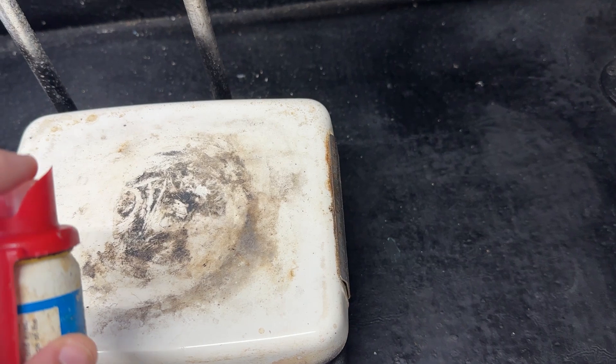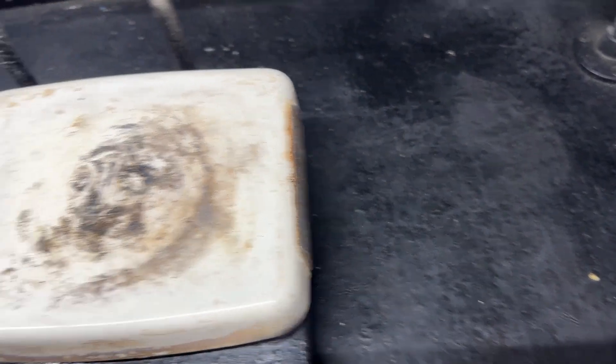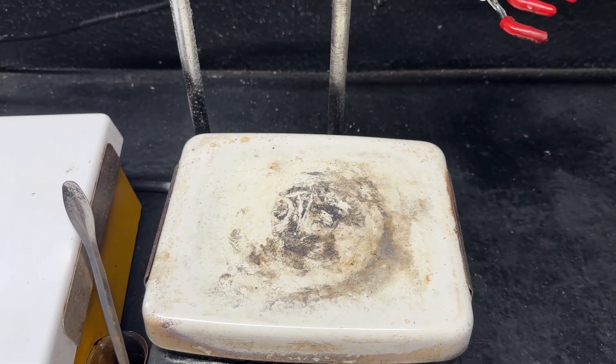So that will give just enough to kind of get the burn but not have too much serious effects from it. So yeah, heat up the hot plate now and we'll see how this goes. Okay so I'm just going to give a shake and give it a spray. And once that heats up we should really start getting the effects from it. It immediately hits the nose and throat - holy crap, makes you want to cough too.